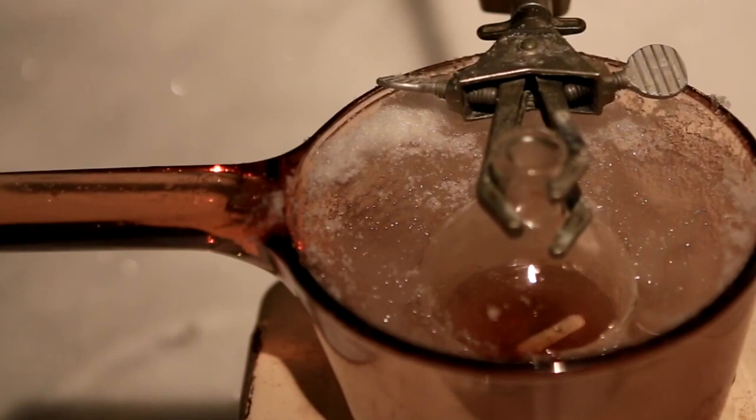A lot of nitrogen dioxide gases will be formed, so this cannot be done inside, and must be done in a fume hood or outdoors.